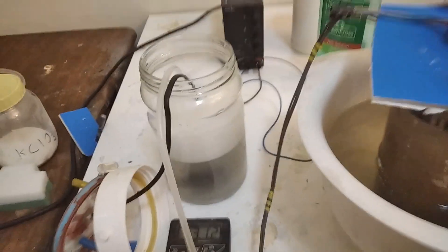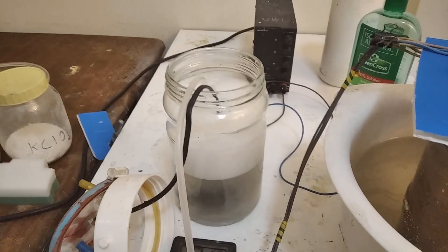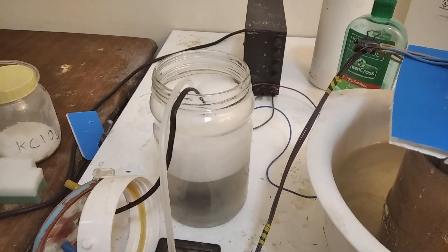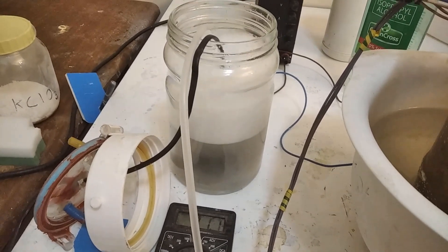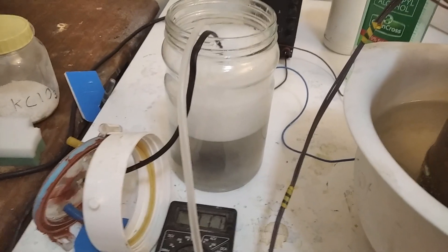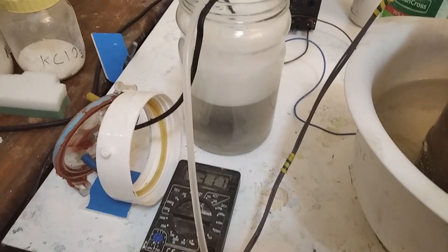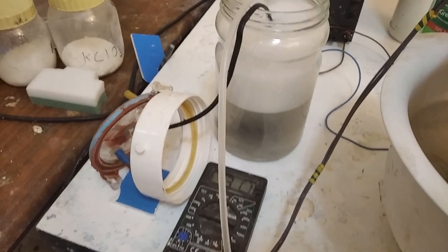The foam is our savior here. It's increasing the active surface area - it's technically not slowing down diffusion, just increasing the active surface area. And in chemistry, everything is important. Since we're not even going to use this solution and it's already being discolored because of the emissions from the cell, we don't really care if it's impure. I should have probably put in a suspension of manganese dioxide and surfactant - that would have been much better than this. But I use this pump for other things, so I don't want to contaminate it with MnO2.